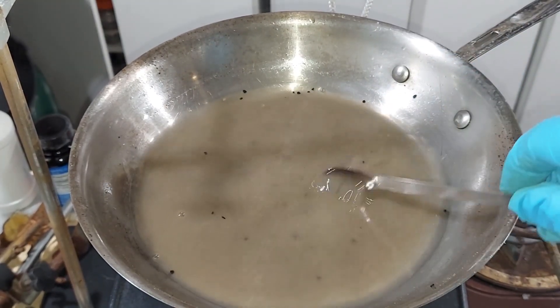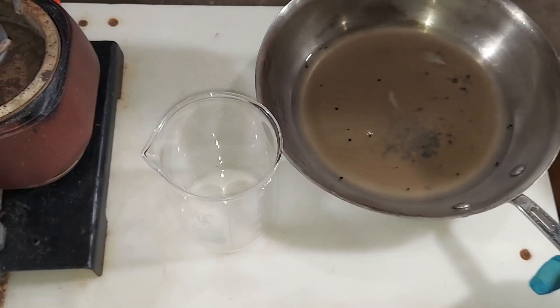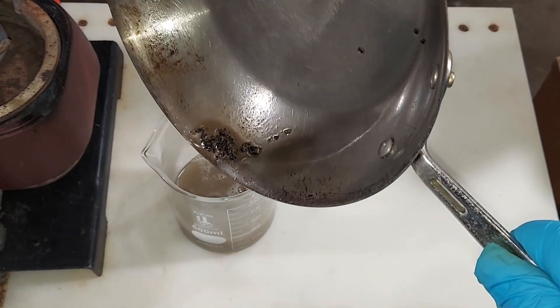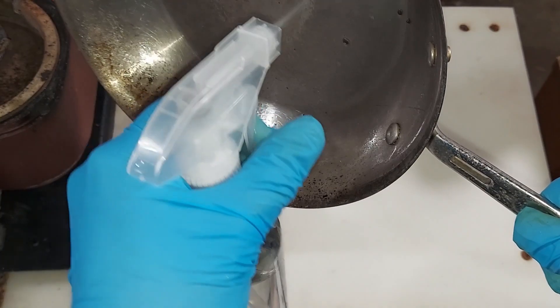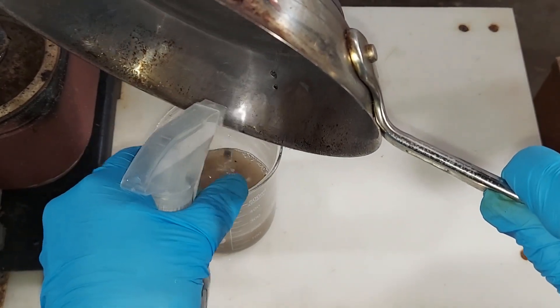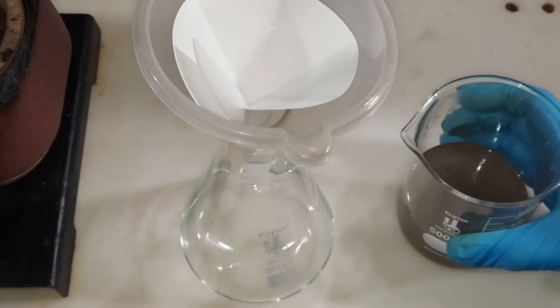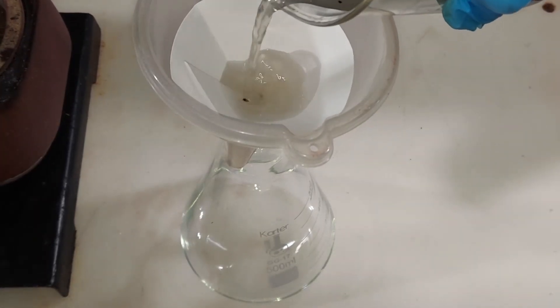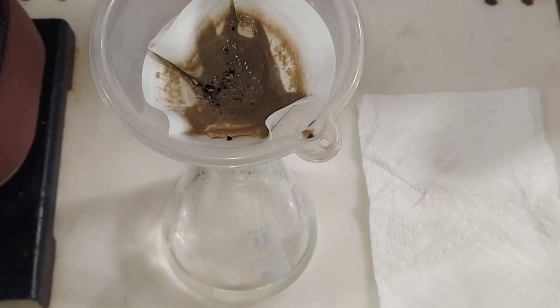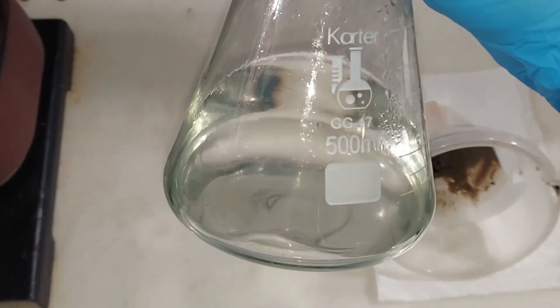I ended up heating the distilled water a bit just to get the last bit of sodium nitrite dissolved. I'm going to transfer it to a 500 milliliter beaker, let it cool down, and then we'll filter it. I have some distilled water here again to rinse out whatever remaining nitrite might be in there. The solution's cooled down most of the way — certainly enough — so I'm going to start to filter it. And we're done. I'm going to remove this. It's nice to get all that sludge out of there.